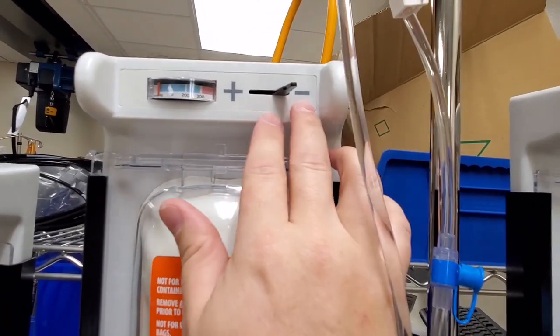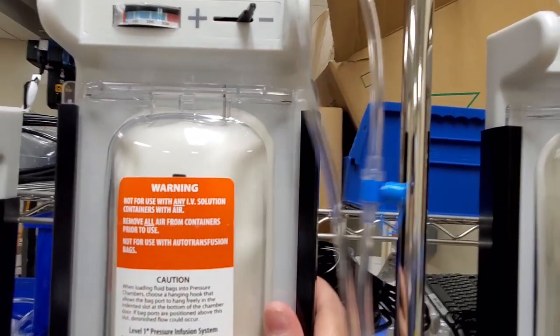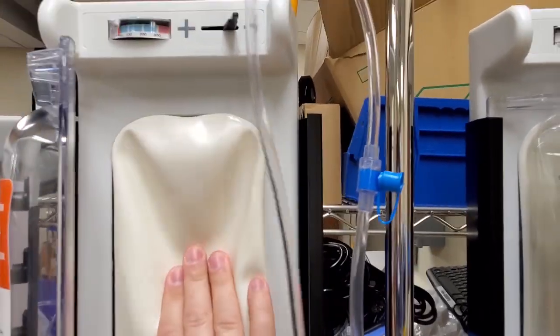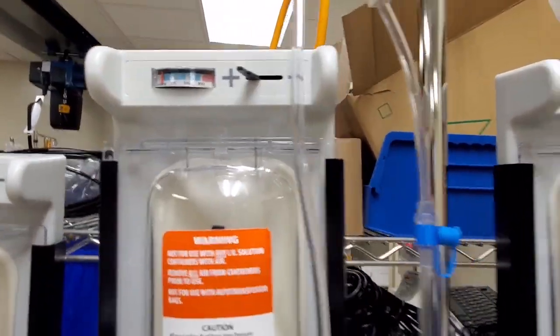And you see how I hit the minus? It drains pressure from the reservoir so I can open it safely. Load another saline bag. Close the lid. Pressurize it.